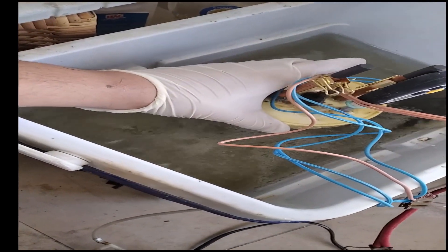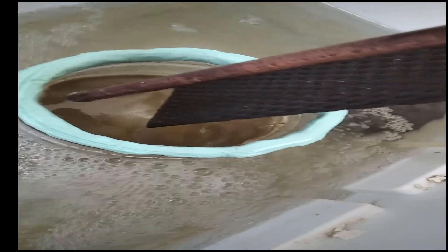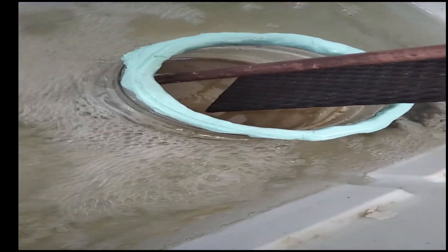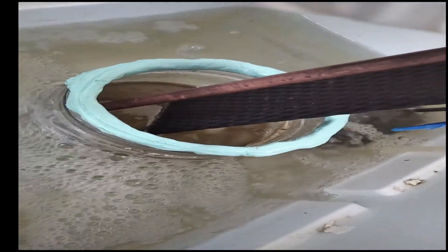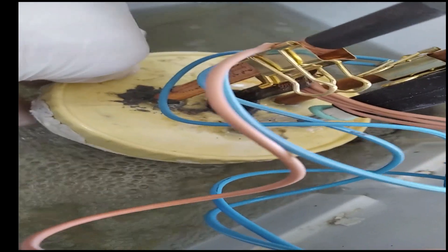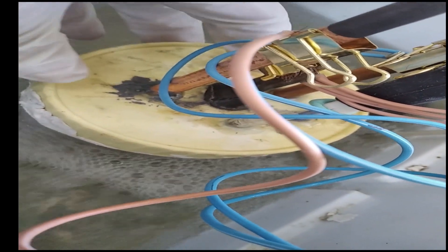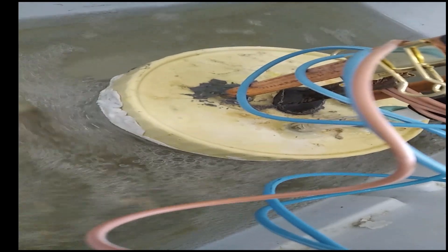Short update. Even after running at incredibly cursed operating conditions, the electrode is completely fine. I've rubbed against it — absolutely no residue on my finger — so it's running completely fine. The solution still looks clear. The cathodes don't look so good, but I've also tested some of this product and it has indeed formed perchlorates, because the product immediately precipitates upon contact with potassium chloride.